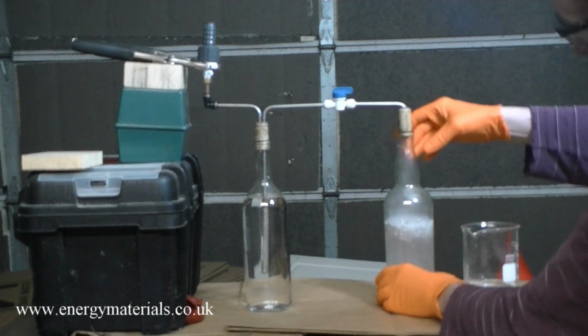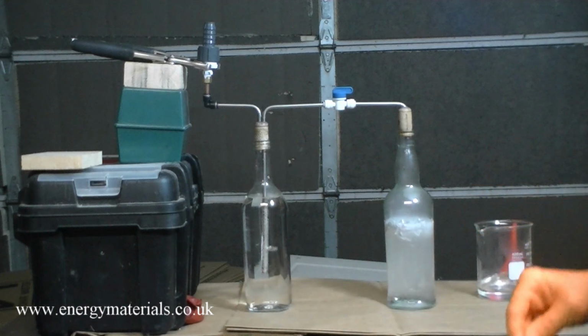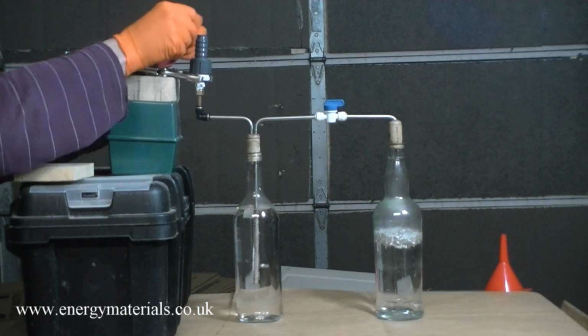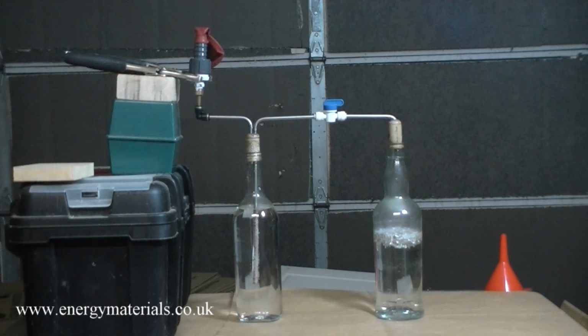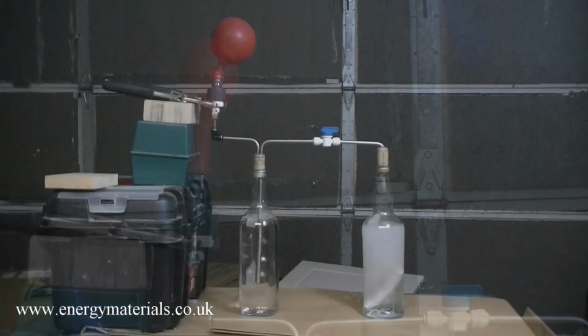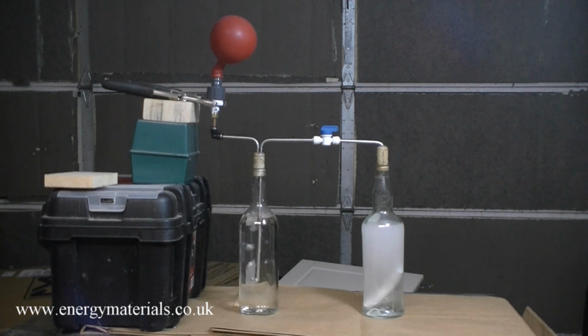With the bubbler connected, bubbles can be seen to form. We are attempting to collect this gas in a balloon. The initial amount of magnesium, which was reacting with the hydrochloric acid, was insufficient mass, so an additional piece of magnesium was added to the container with the hydrochloric acid to continue the reaction.